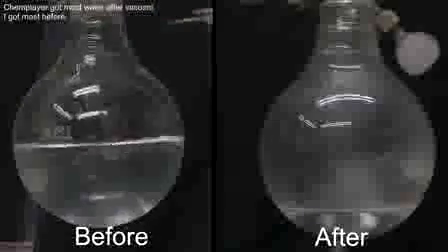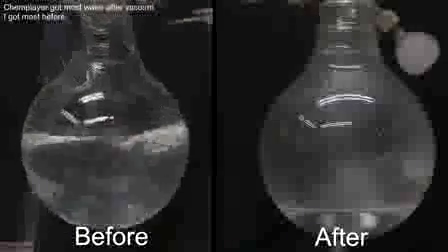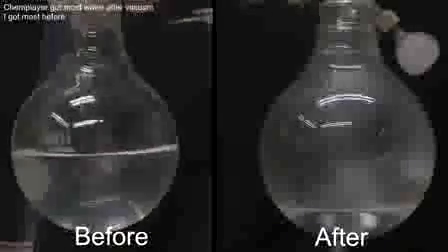The heating mantle was removed and I let it cool down to around room temperature, and then I cooled it down even further using an ice bath. Here's just a quick comparison on how much was collected before and after the vacuum was applied.